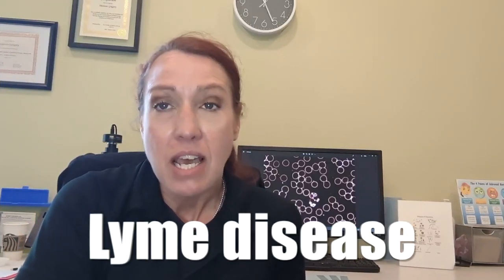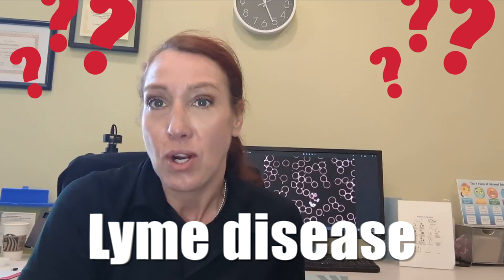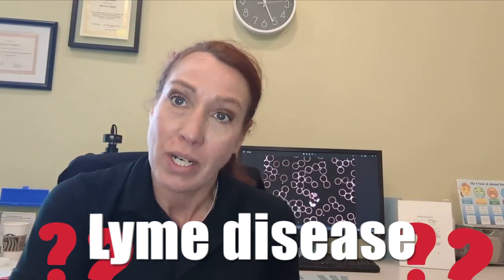I want to touch base today in regards to Lyme disease. There's a lot of questions in regards to Lyme and live blood and what can be seen, and it is a major thing that is very prevalent if you know what you're looking for in live blood.